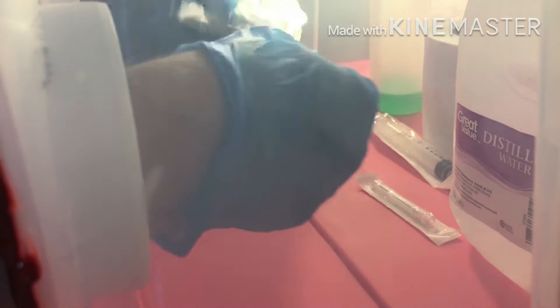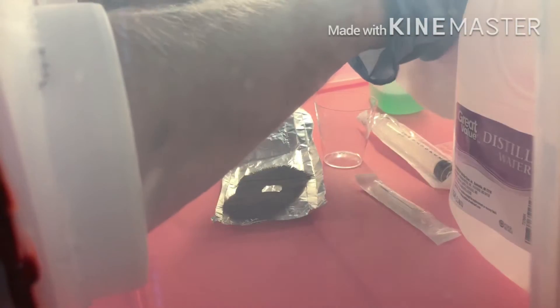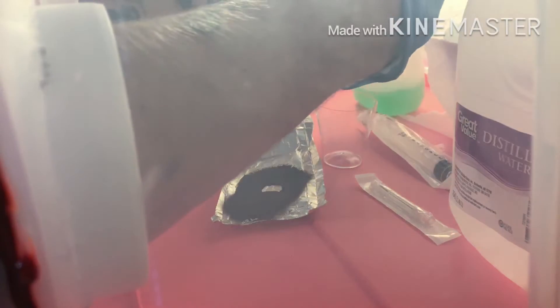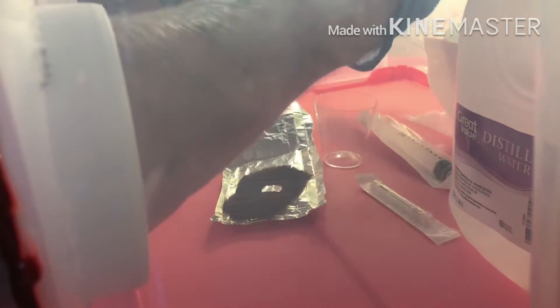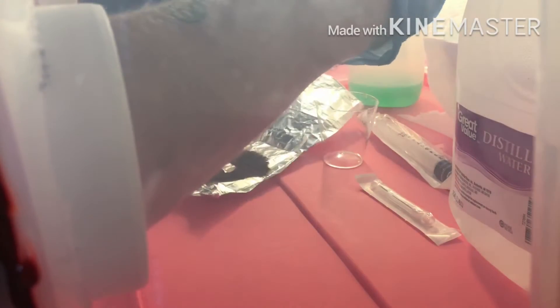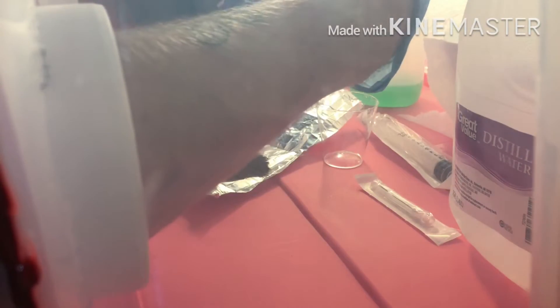I'm very excited to see how these things grow. Everything in here is pretty sterile — I've wiped everything down, every little thing. But I'm gonna go ahead and wipe my scalpel down a little bit, especially just the blade part.